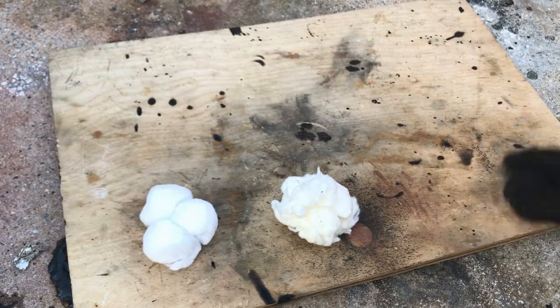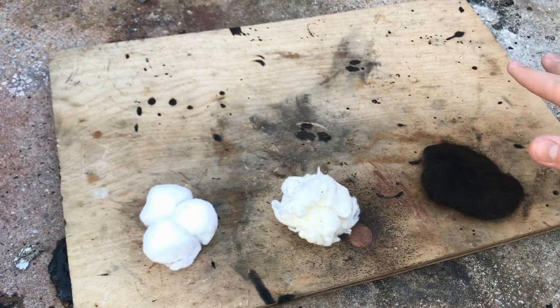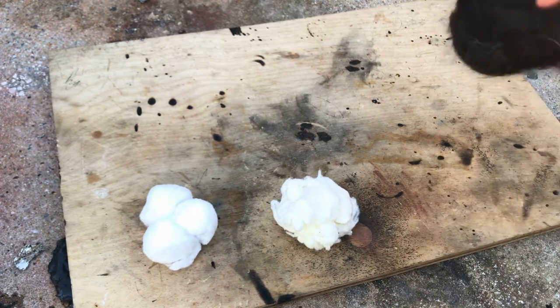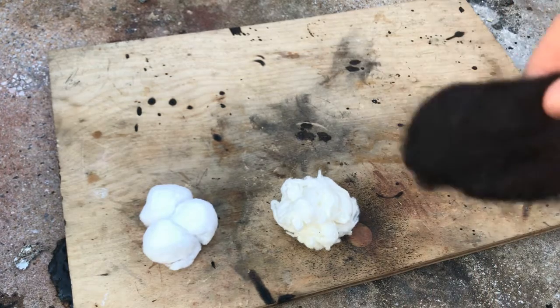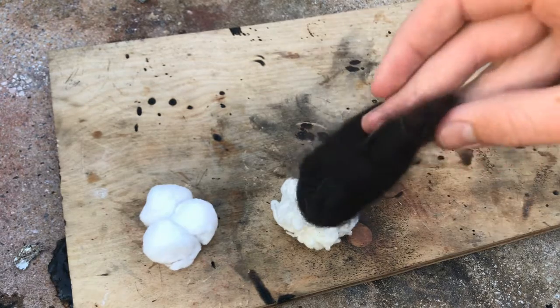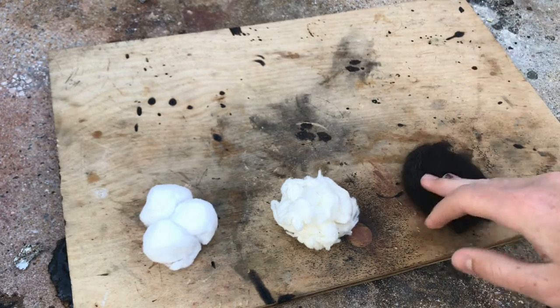In this video we are going to be nitrating hair, which is something I really don't think has been addressed before on YouTube. I haven't found anything regarding it anywhere, even off YouTube. Hair doesn't nitrate that well, but it can likely form nitrate esters in some way. Hopefully we'll see that formation and it'll burn better than hair regularly does. I'll compare regular hair to the nitrated hair and see the difference in burning rate.